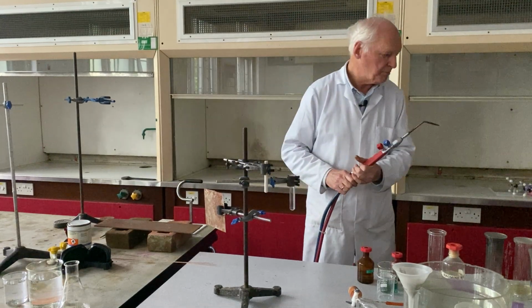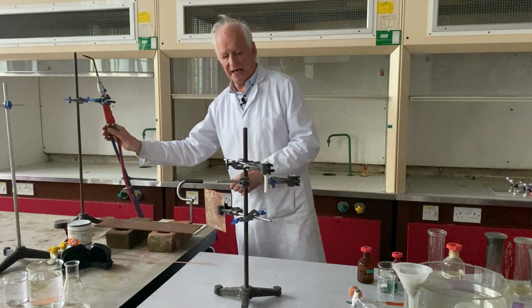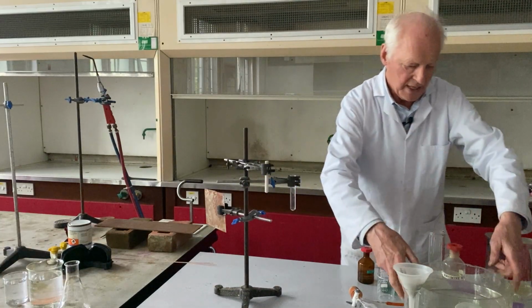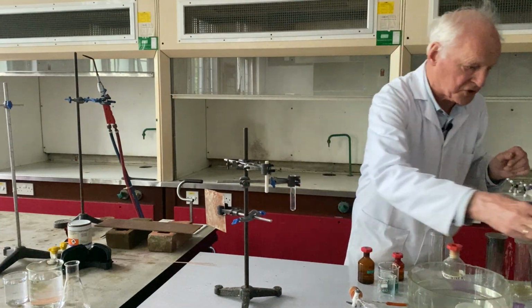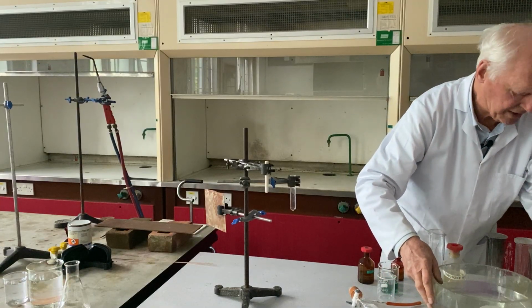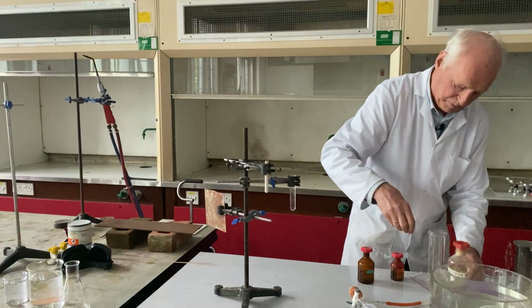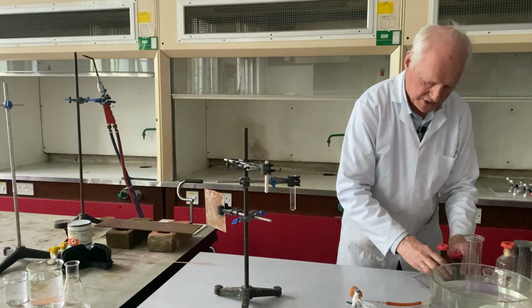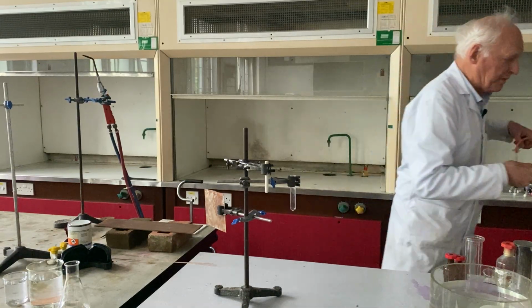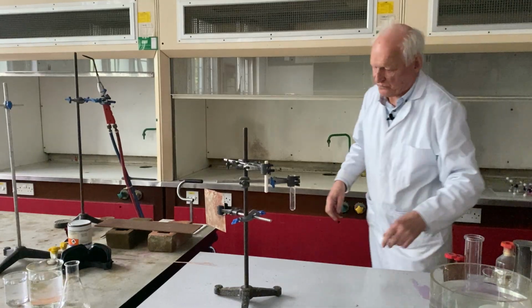Now, the way we put it, if you don't mind, I'm going to start off, obviously, by taking some safety precautions. I'm just going to move my apparatus around a little bit as well, just out of the way here, and we can put our flask over there, to make some space for the equipment to do with the welding. So if you don't mind, we'll just put things out of the way there.